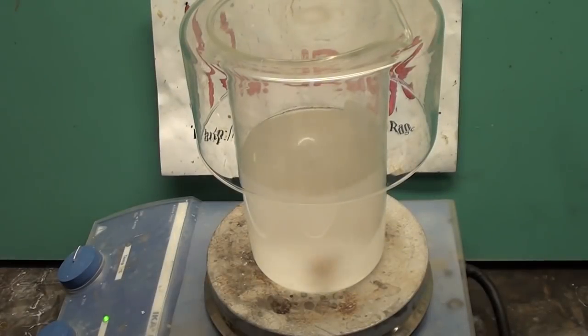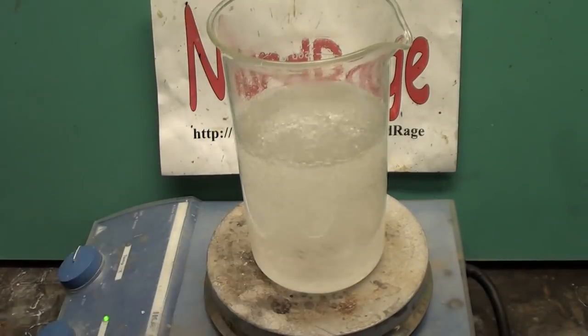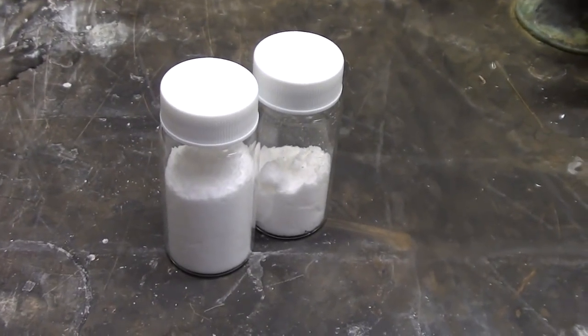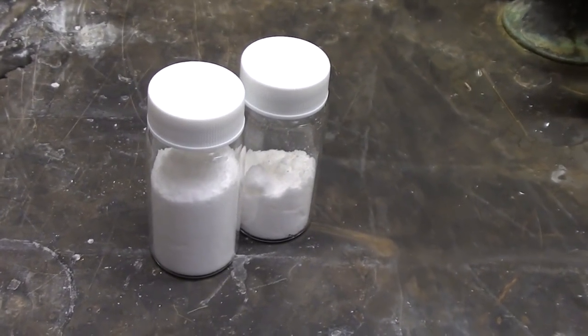Now for some additional notes. What I showed you was the crude method that gave me a yield of about 40% based on hypochlorite. For you advanced chemists, there are a few improvements to squeeze out an extra 10-20% yield.